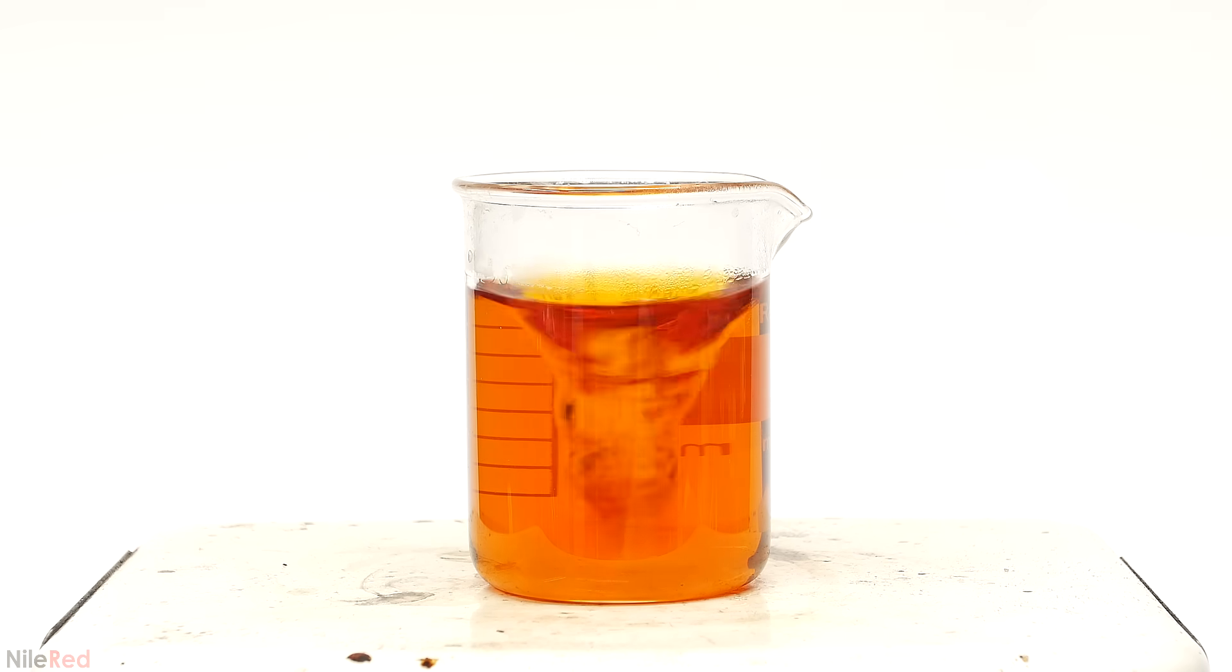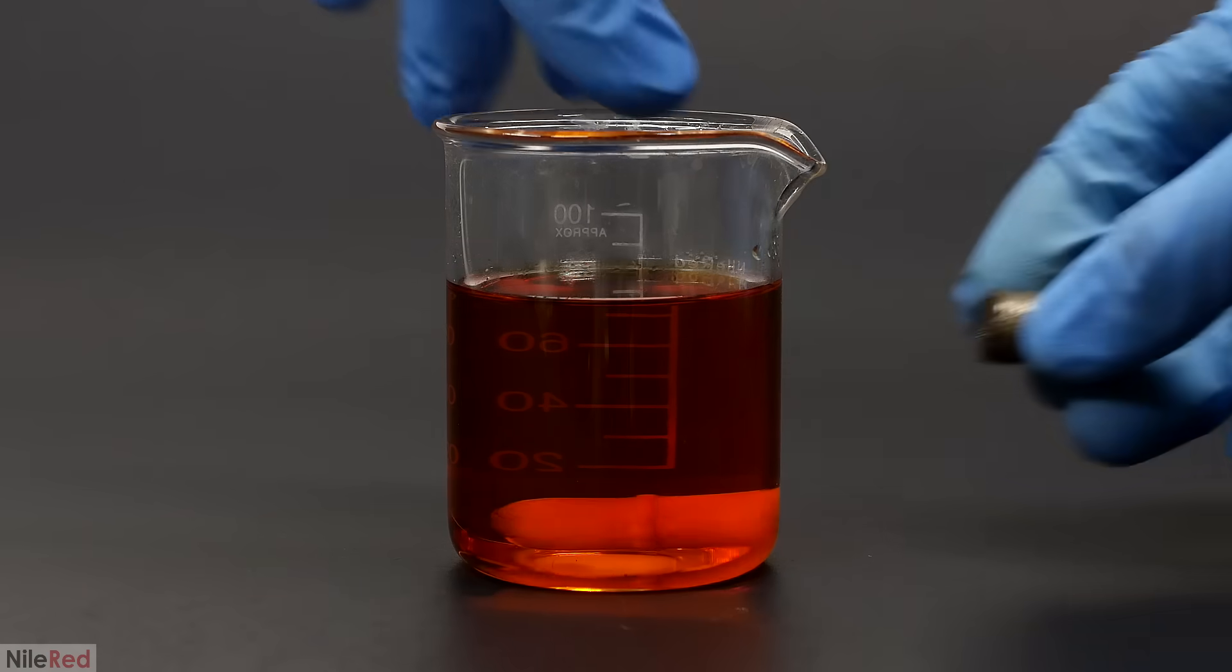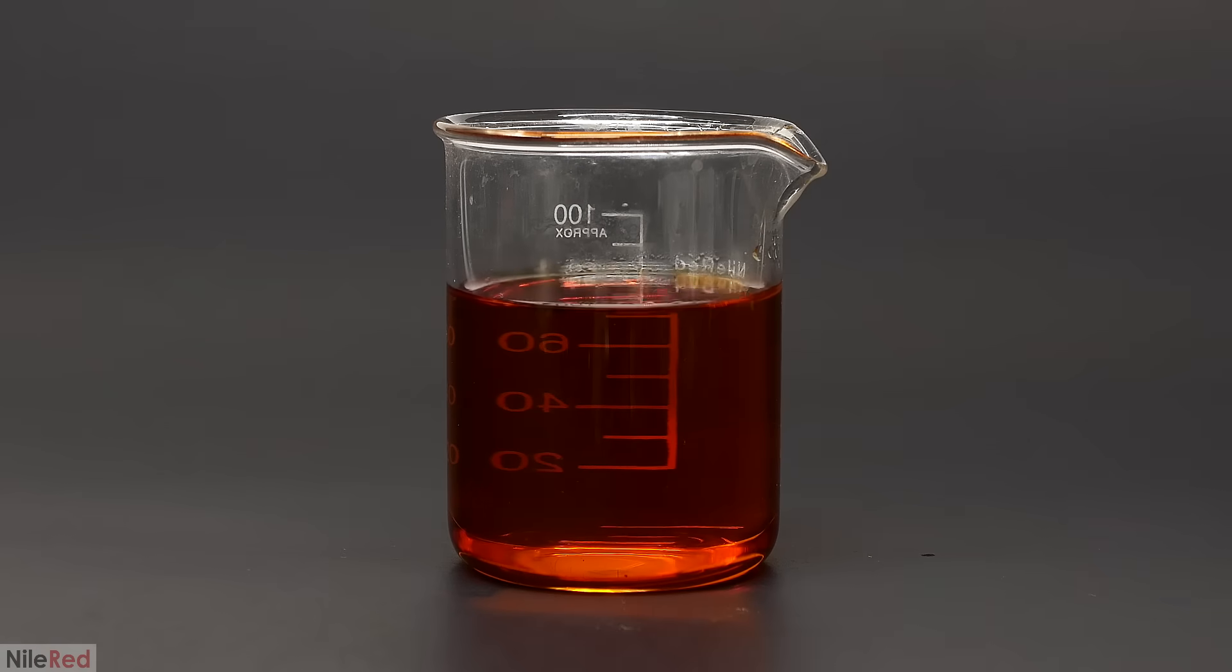Then, I evaporate further another 20 mils or so, so the total volume is around 80 milliliters. At this point, I take it off the heating, remove the stir bar, and wait for it to cool.